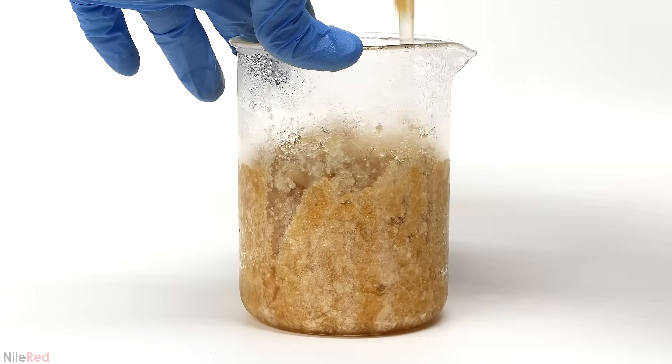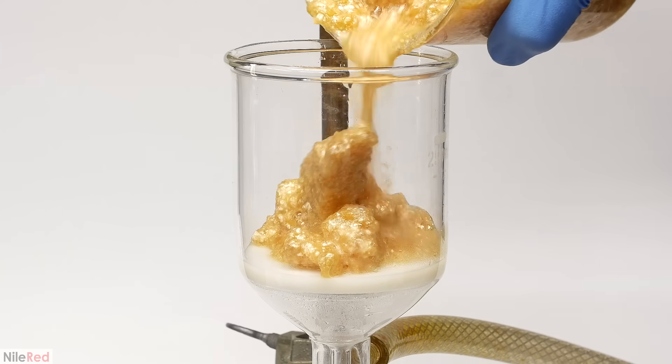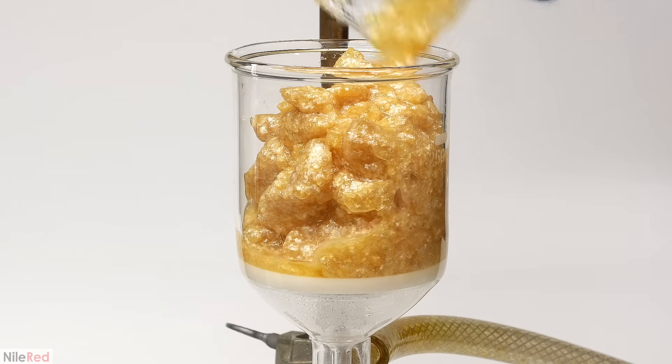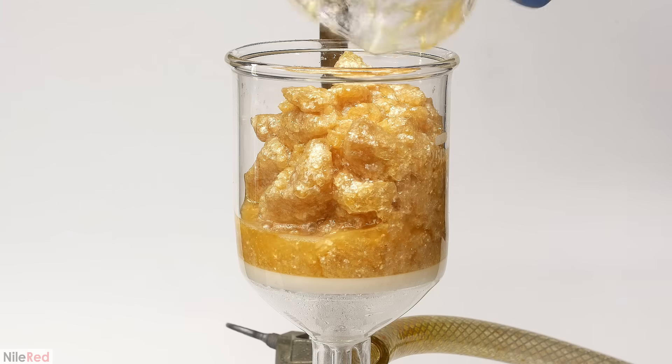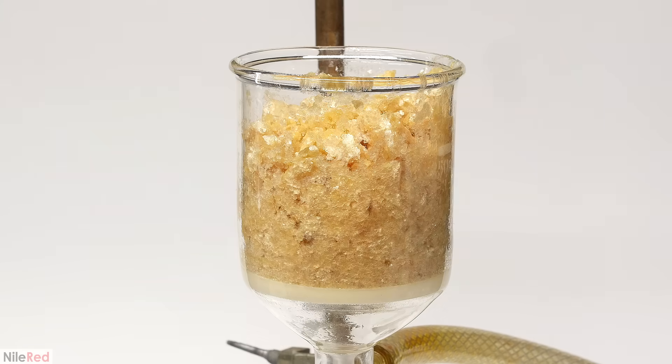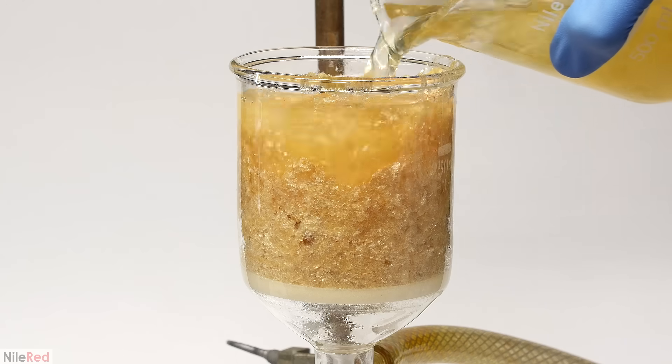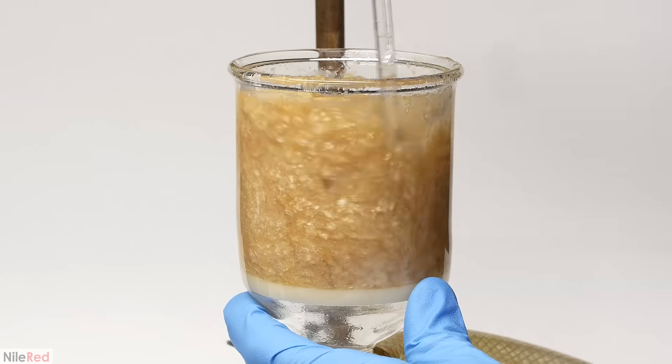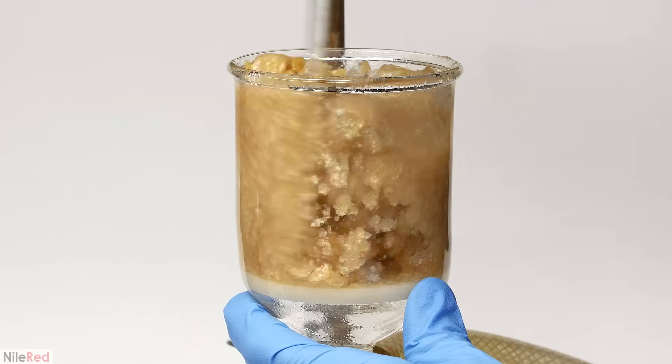break it into smaller pieces, and filter it off. The crystals here still aren't perfectly white, but it's definitely a lot better than before. When everything's been pulled through, I wash the beaker and the crystals a couple times with some ice cold dilute nitric acid.